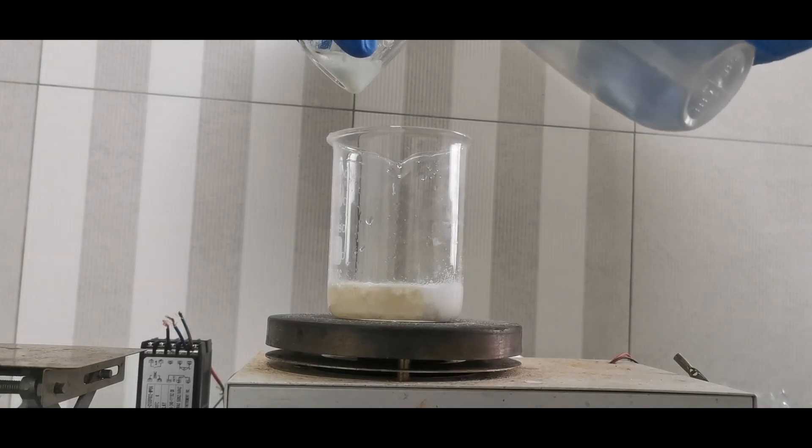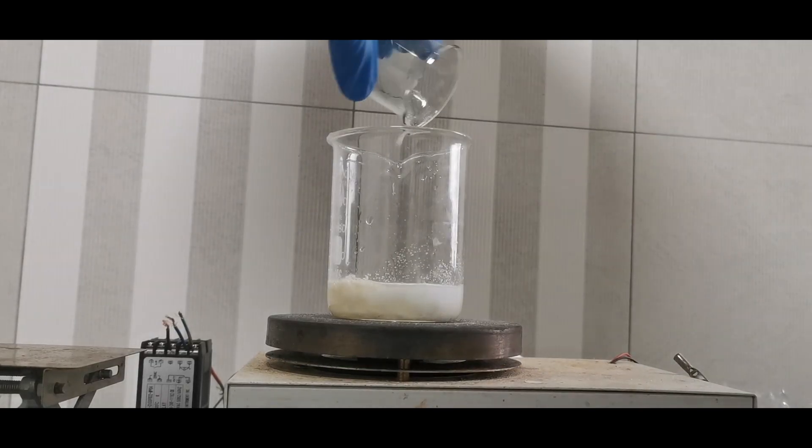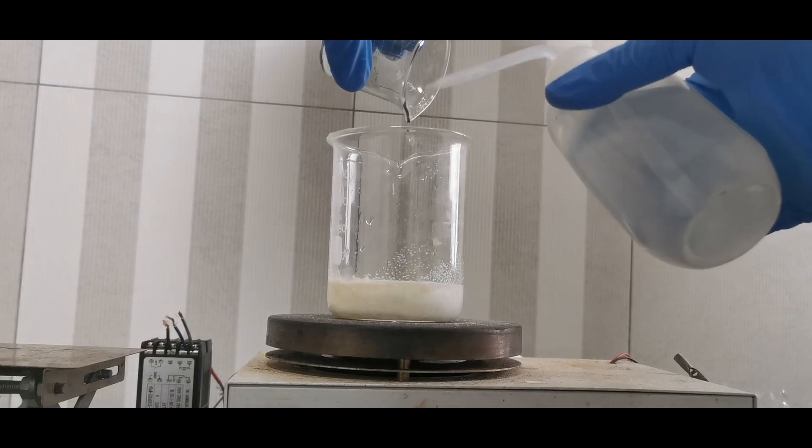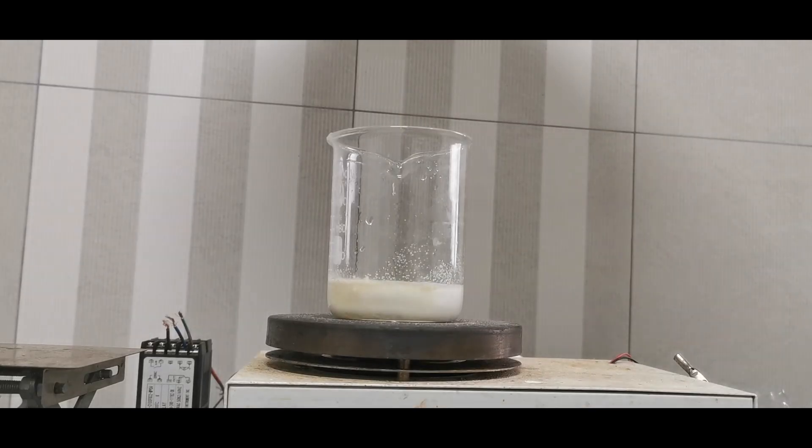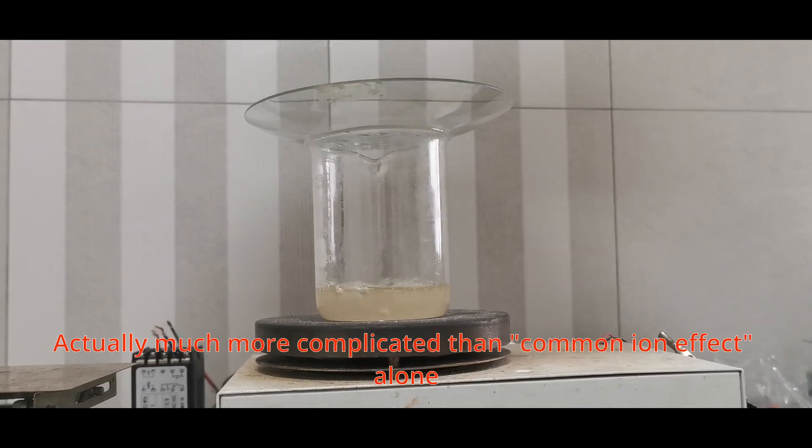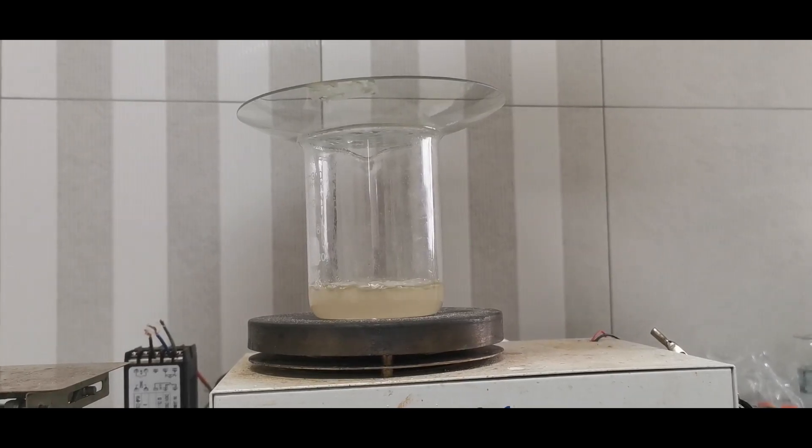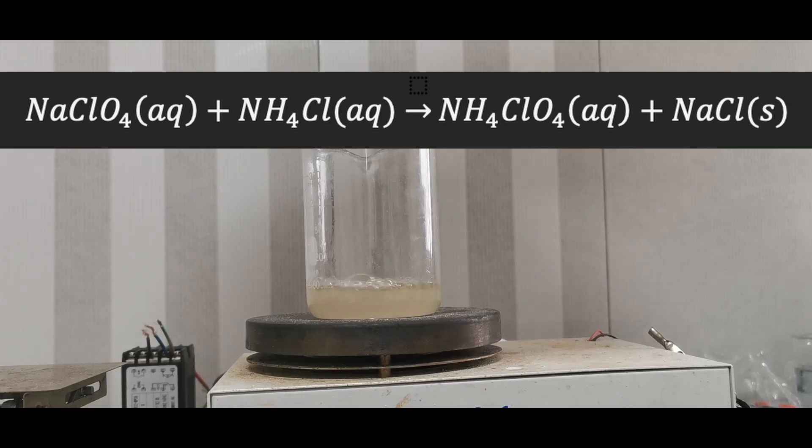I then add 15 grams of ammonium chloride, which represents a 60% molar excess, and boil the mixture. This excess is necessary to decrease the solubility of ammonium perchlorate, thanks to the common ion effect. When the mixture finally boils, some solids do remain, which is sodium chloride produced from a double replacement reaction.